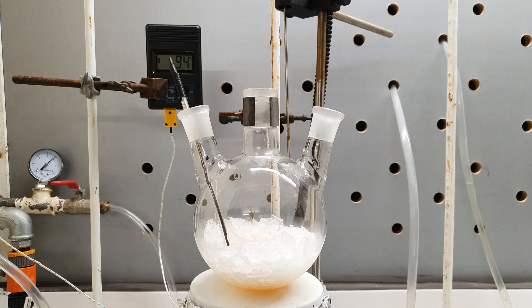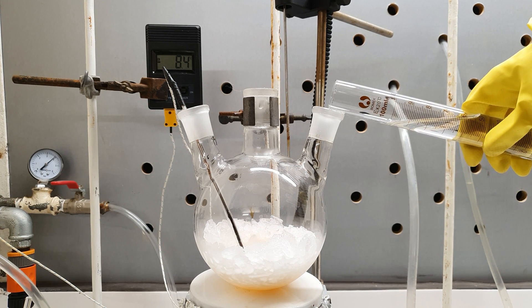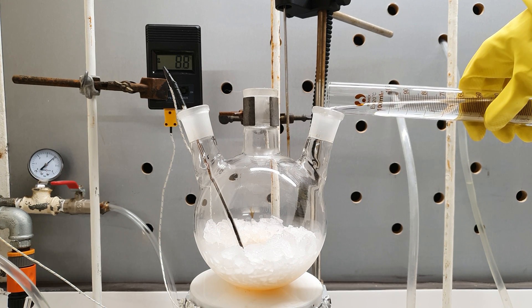This is good because now we are going to do a neutralization, which is very exothermic. To neutralize the acid, I added 75 ml of sodium hydroxide solution I made earlier.